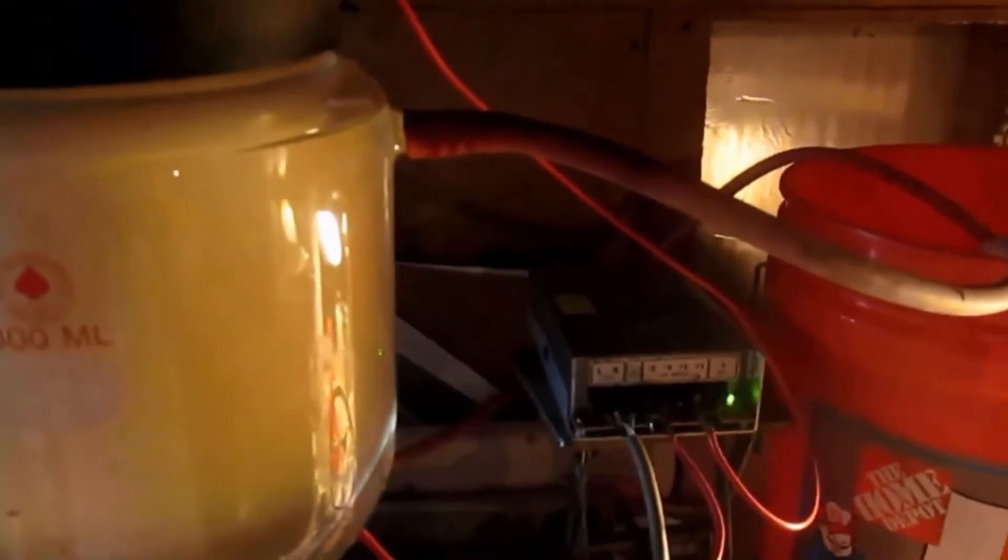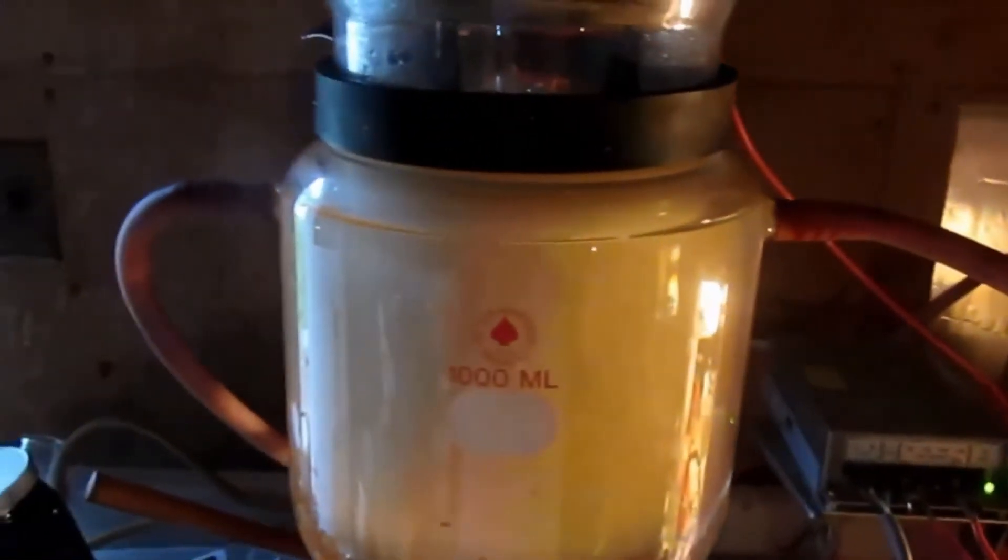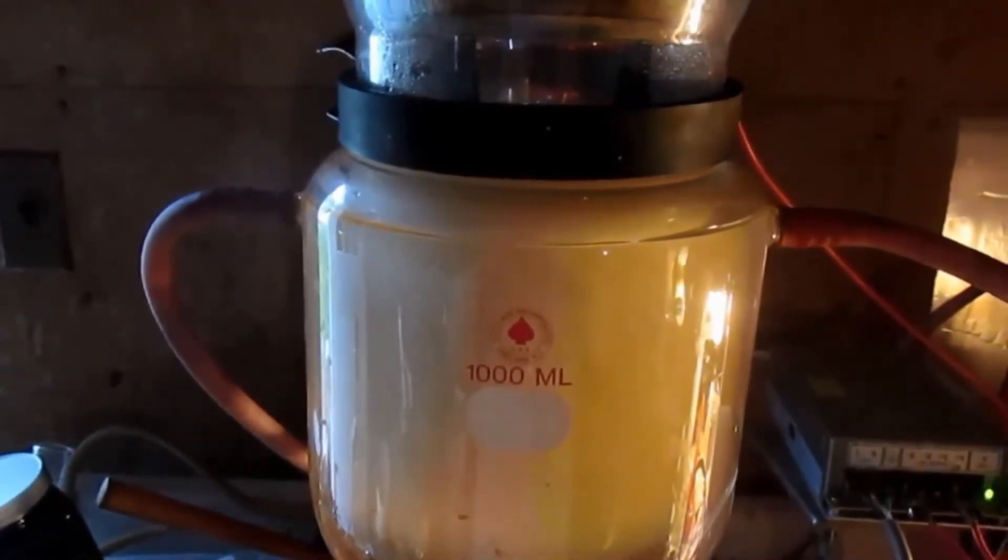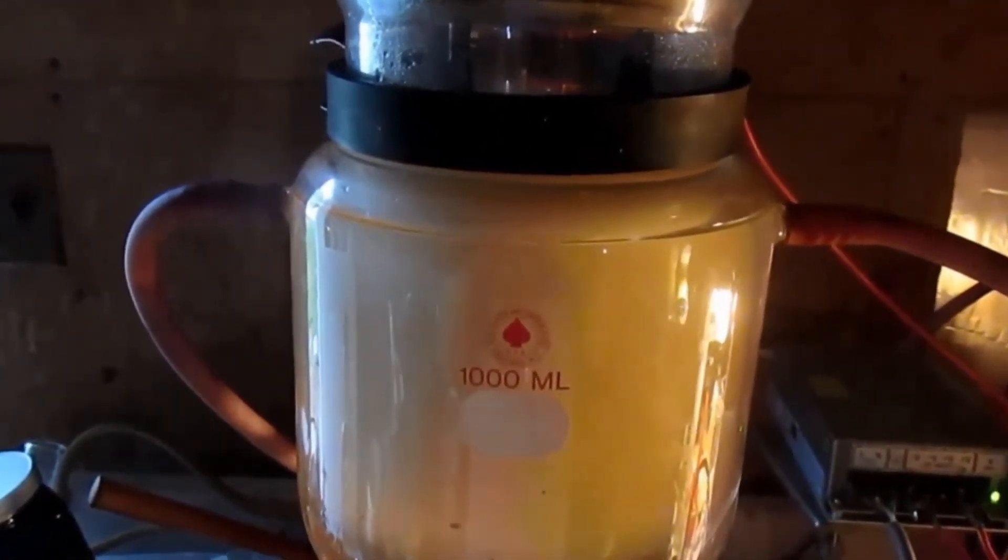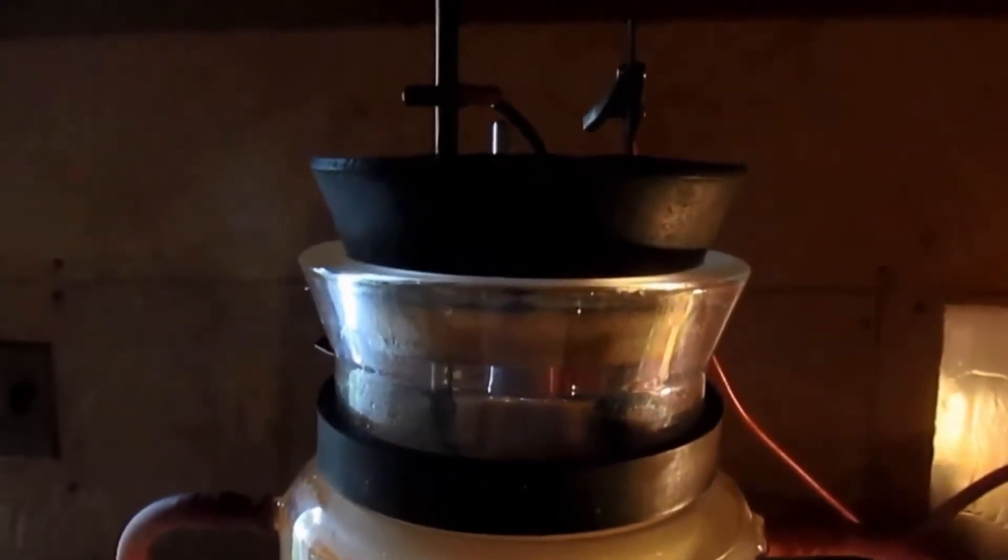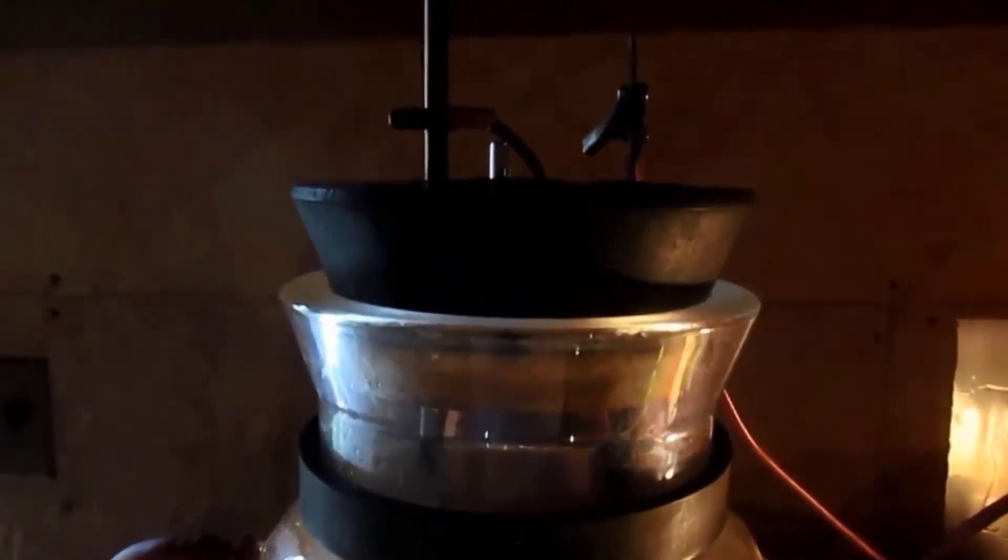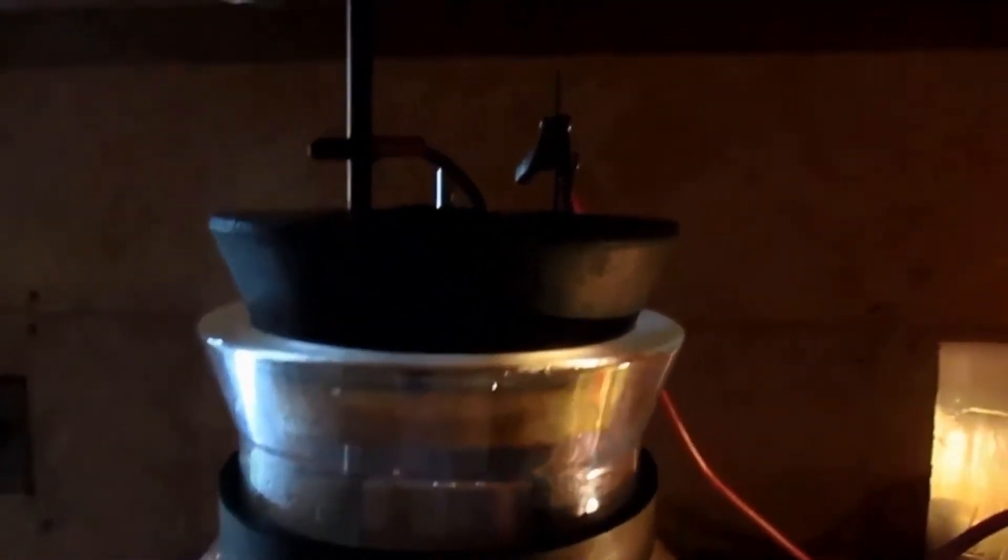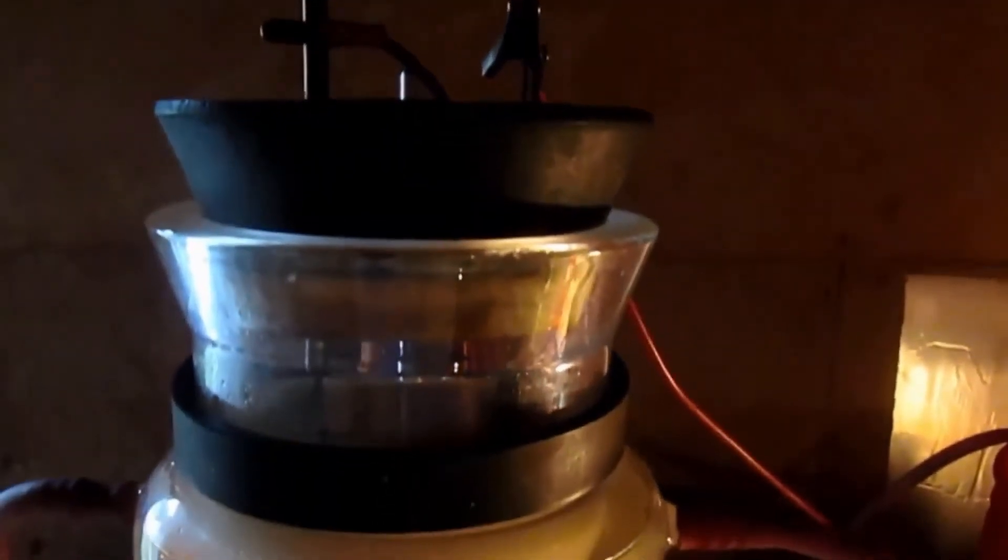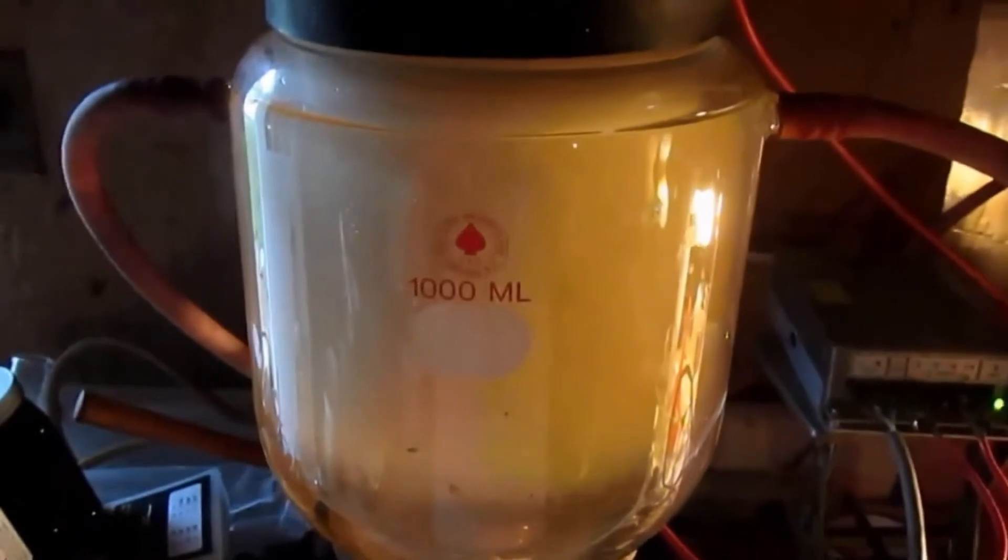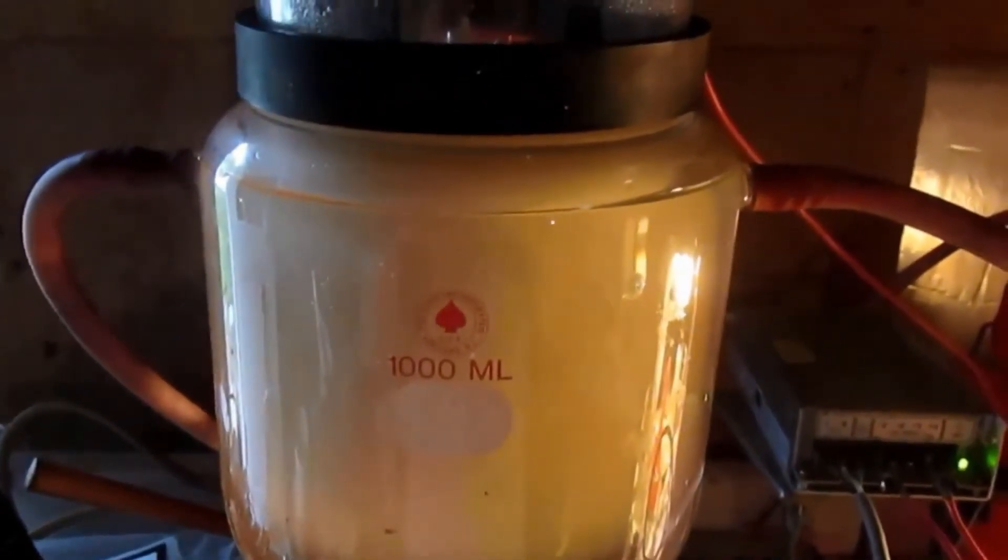Using a power supply of 6.5 volts and 20 amperes, this is going to require about 60 hours, but we should probably let it run for about 65 to 70 hours just to be sure of complete conversion. Using a size 16 rubber stopper, what holds in the rubber stopper is a titanium mesh to serve as the cathode. For the anode, I am using a titanium substrate lead dioxide anode. We will come back in about 65 hours and see the result.